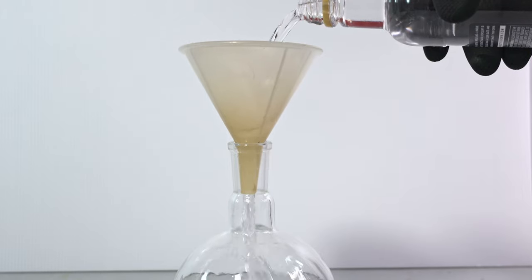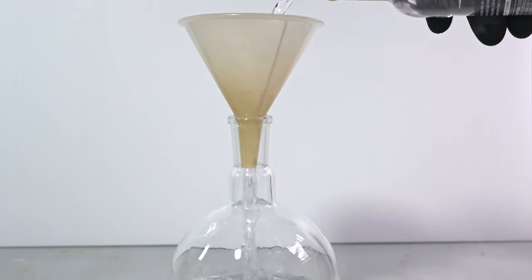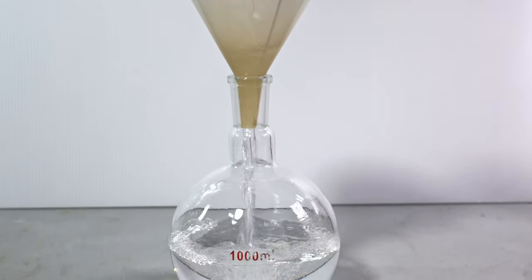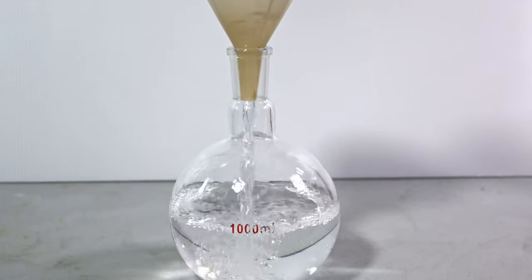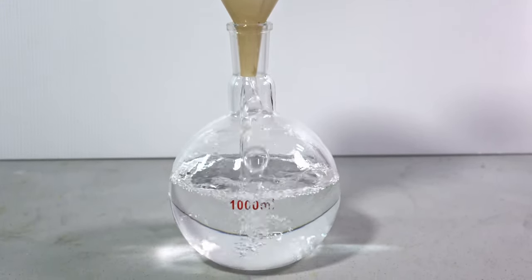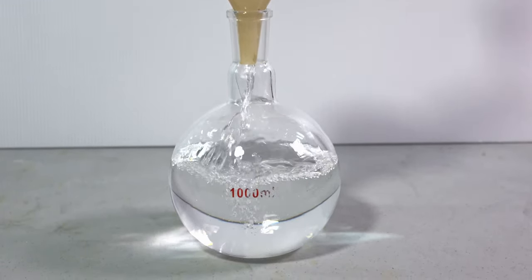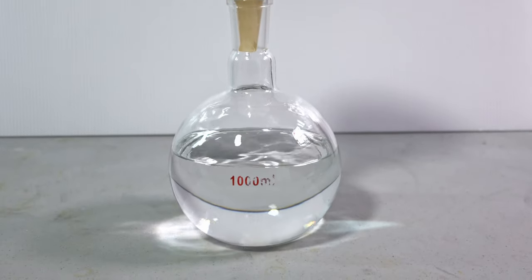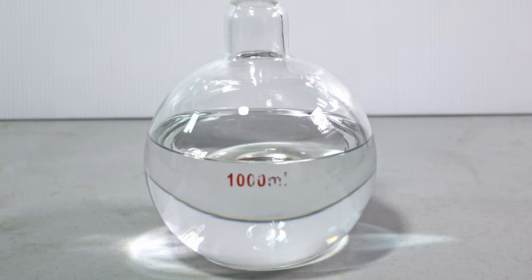The first thing we're going to do is pour out our Everclear into a boiling flask. We have to concentrate it to at least 90% so that ether synthesis will proceed more rapidly. Having all this excess water will impact the yield of our ether. Notice how refractive the Everclear is. That's the ethanol part in our solution.